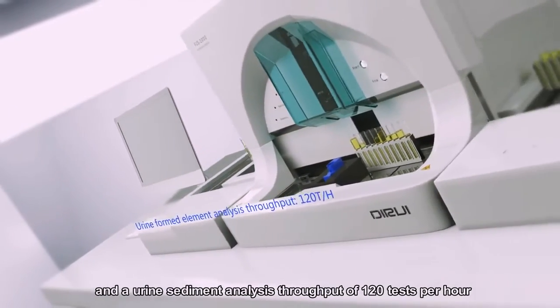The operator may choose from three user-friendly operating modes, including dry chemistry analysis, urine sediment analysis, and combined hybrid analysis.